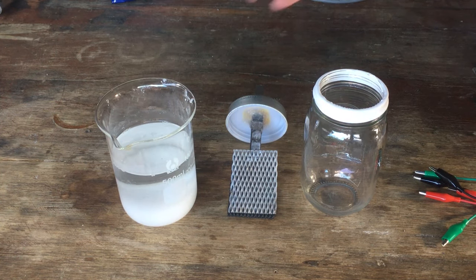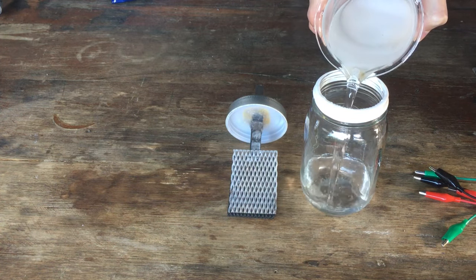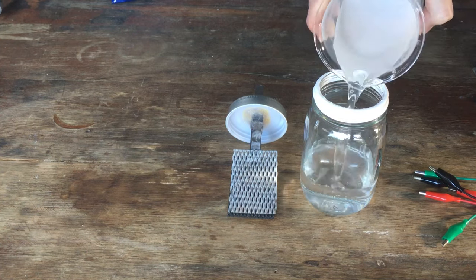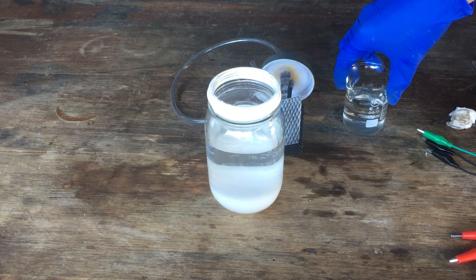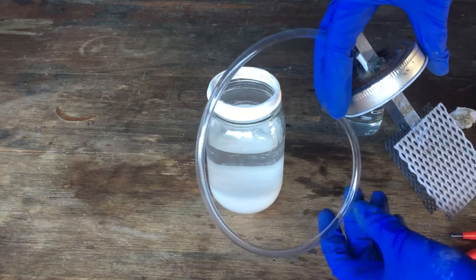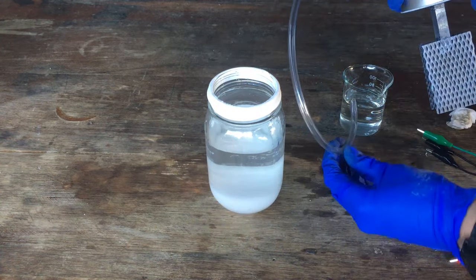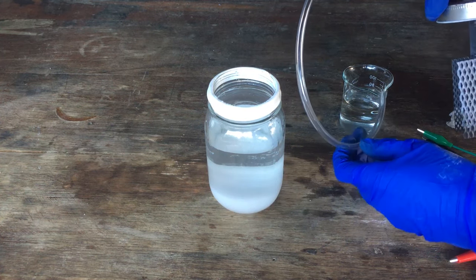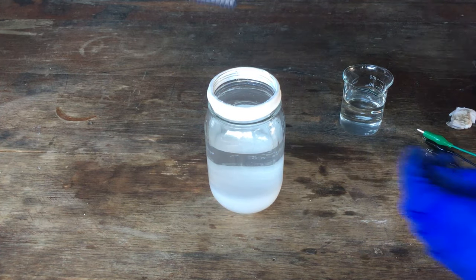So to start the cell, easy as, we're just going to add our sodium chloride solution, along with our undissolved sodium chloride as well, and with that I'll put our electrodes in. I've also prepared a small solution of sodium hydroxide along with a gas outlet tube for the chlorine and hydrogen that will be produced. We will lead our gas output through our solution of sodium hydroxide and that will serve to scrub any of the chlorine gas that comes out of our cell. So putting our electrodes in.